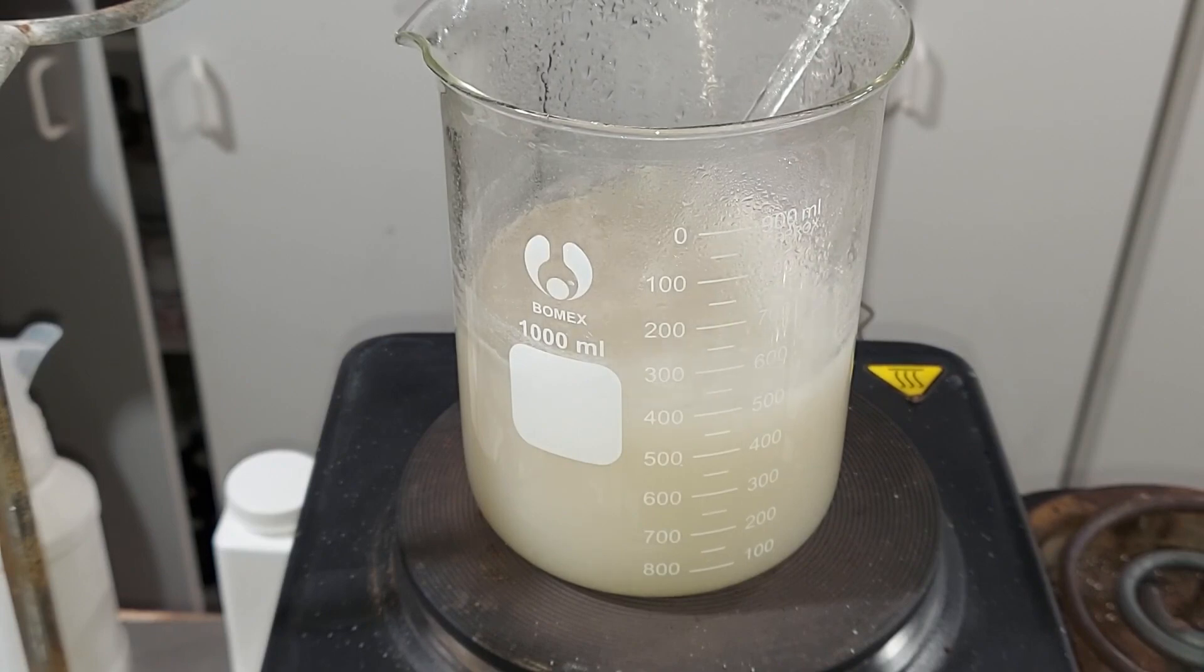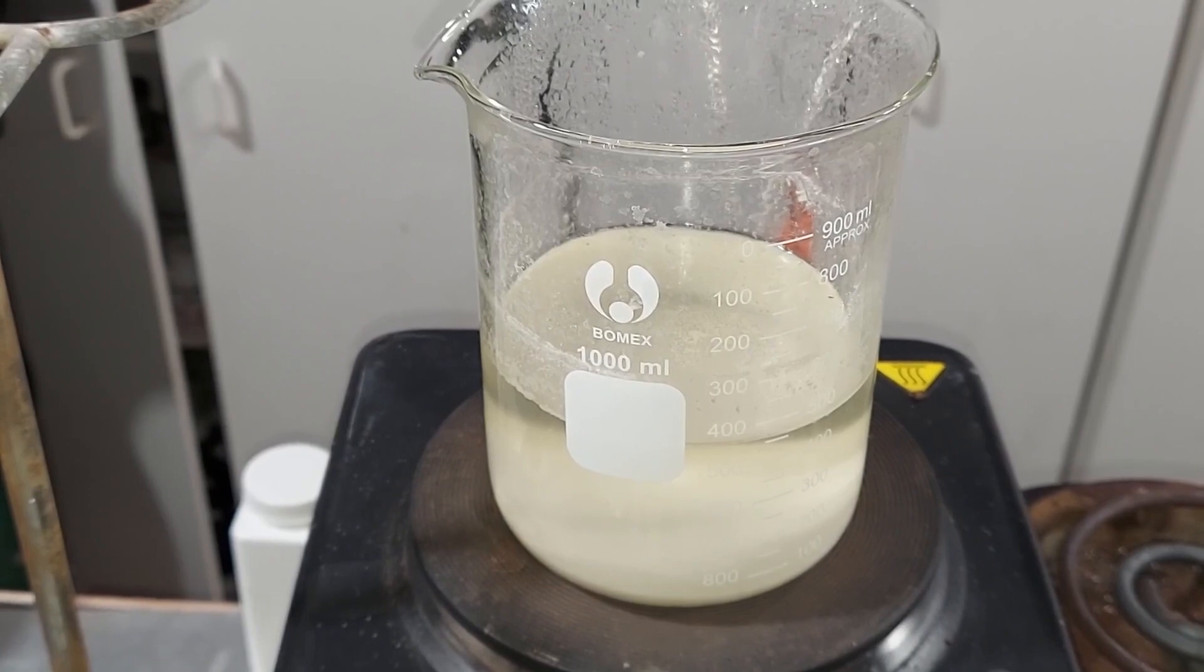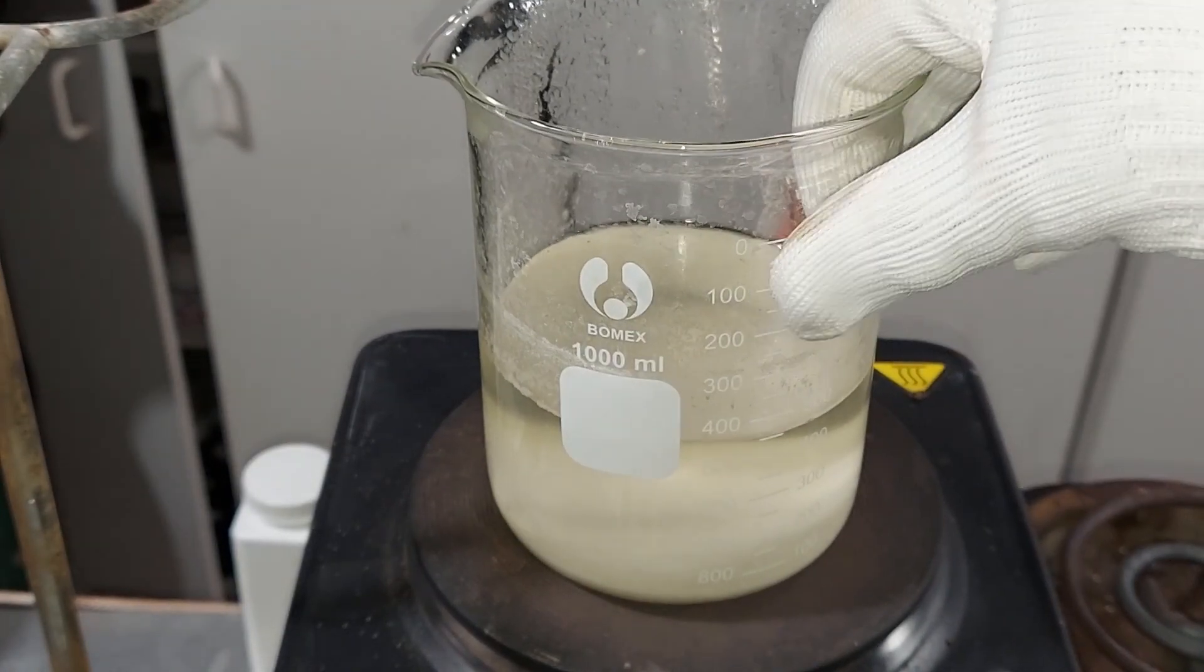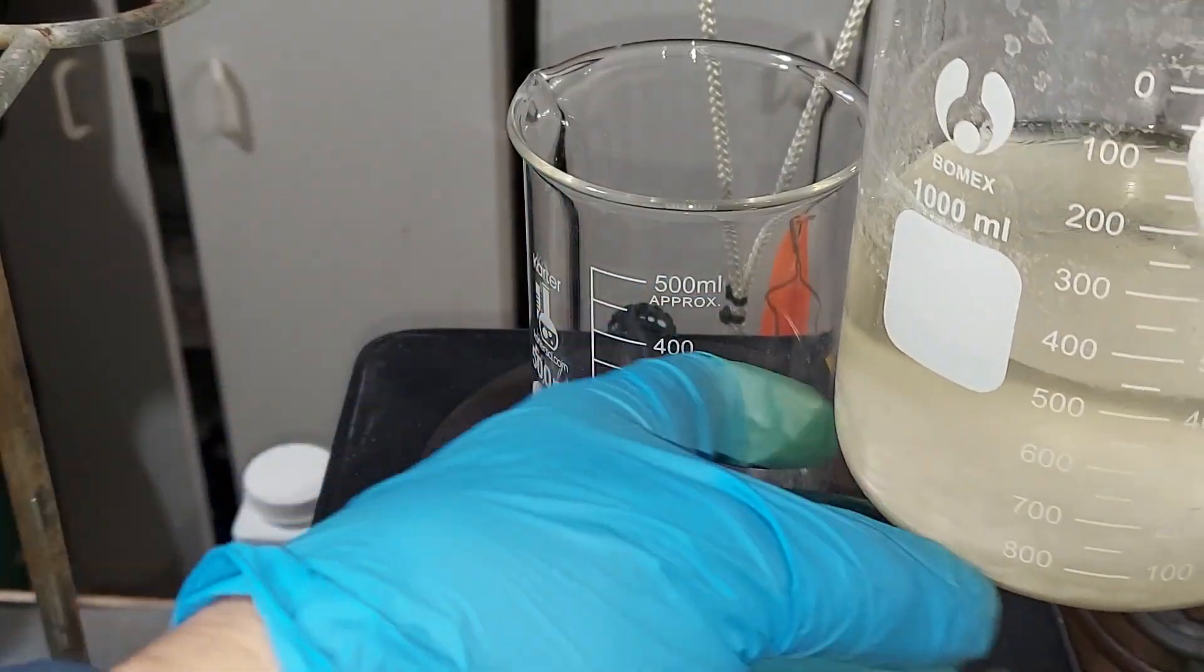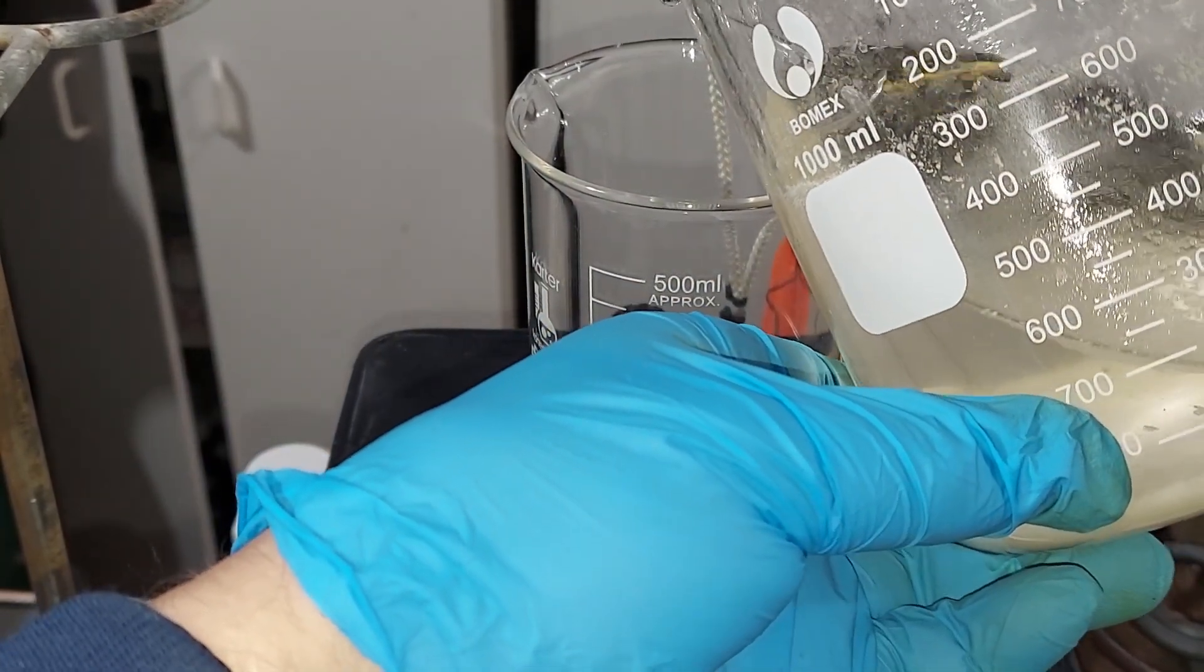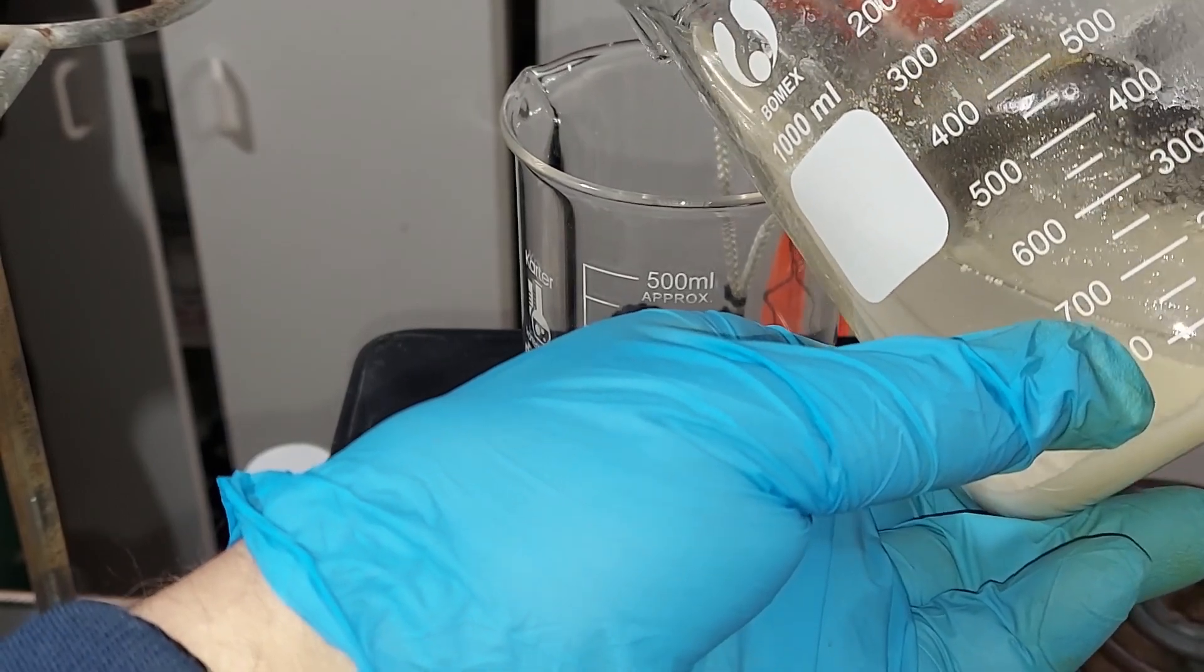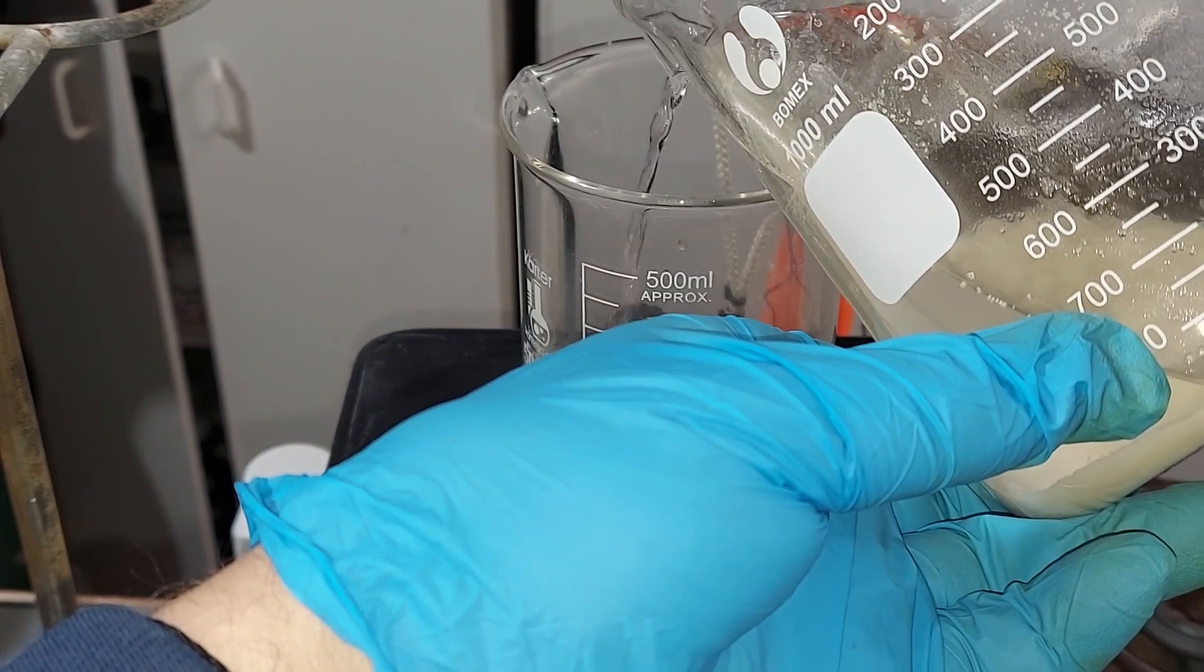Took about a half hour for all the sediment to settle there. I'm sure there's still a little bit in the liquid but I'm now going to transfer the liquid over here to a brand new beaker, very carefully. There are obviously the impurities, the chlorides that are still in there and maybe some anti-caking stuff, but I think I can get most of this over without bringing too much of the other stuff.